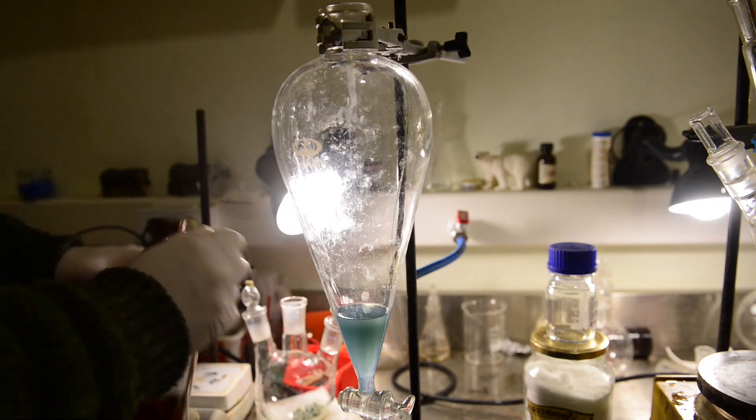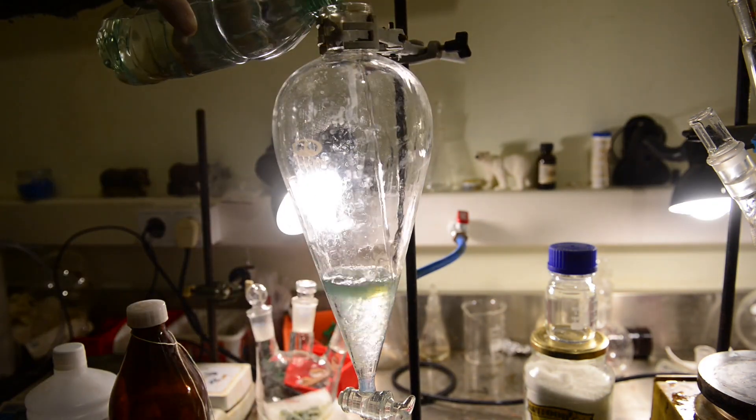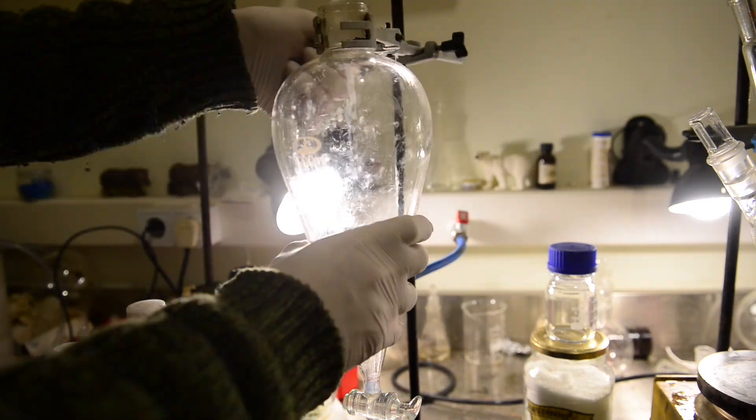We need to wash it thoroughly with distilled water. As we can see after water addition blue color has vanished immediately. Due to washing with distilled water the nastiest emulsion has been formed.